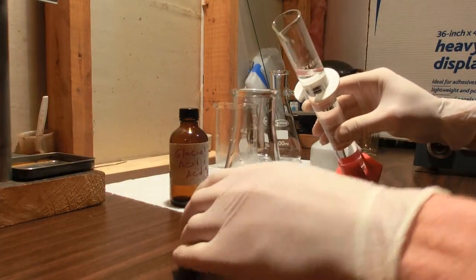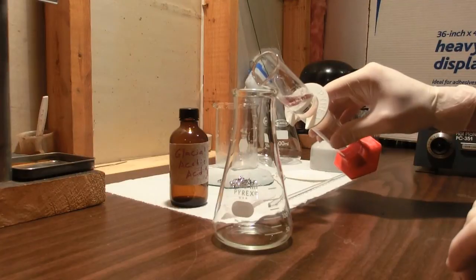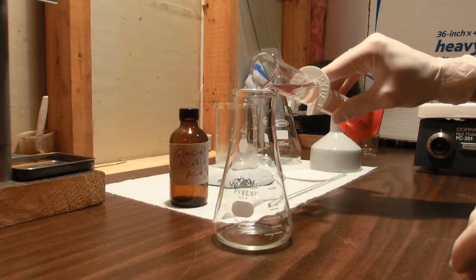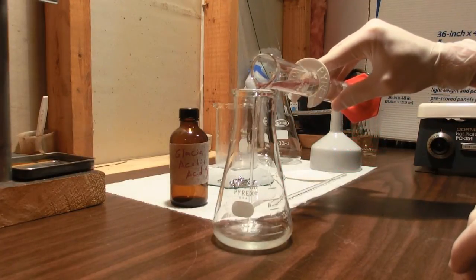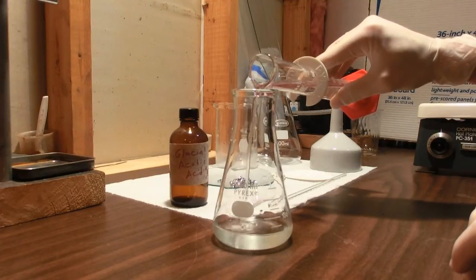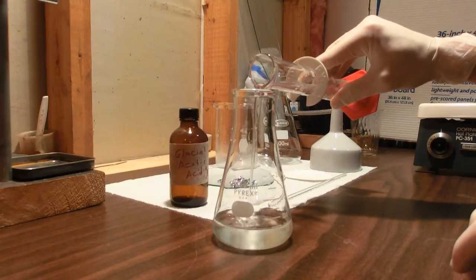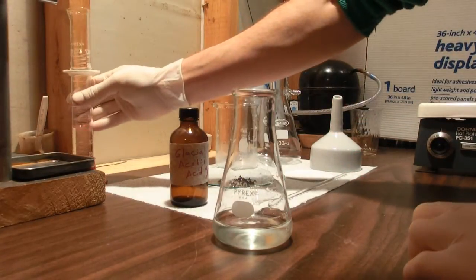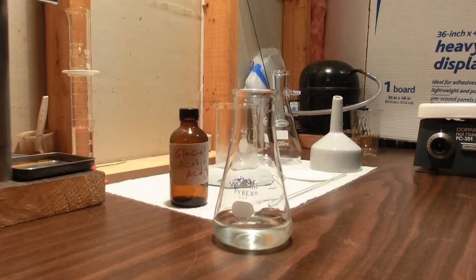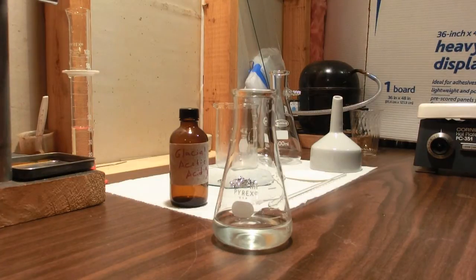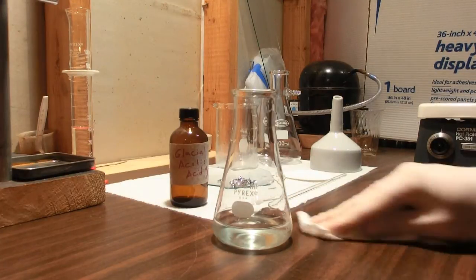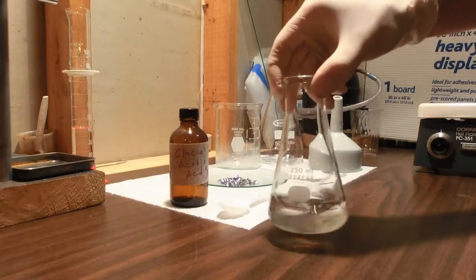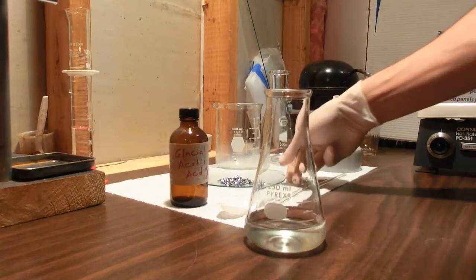I know you're supposed to add acid, but let's just be careful. Okay, that's about good. Clean up the spill.